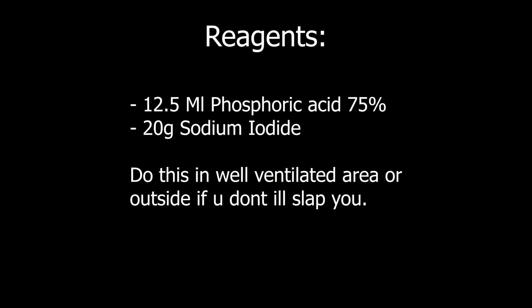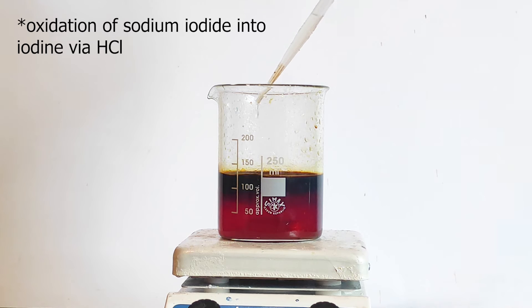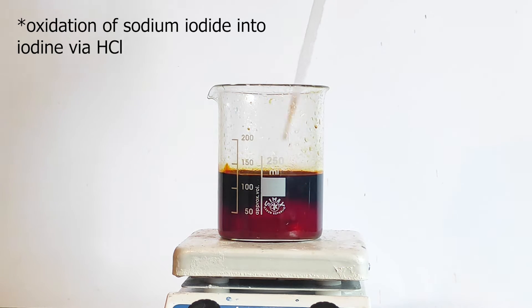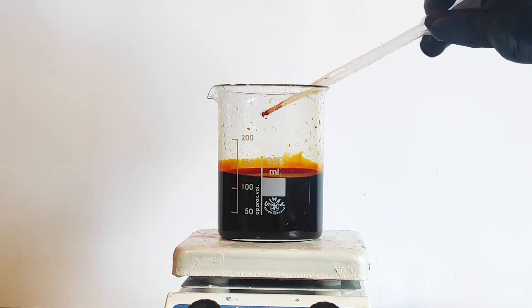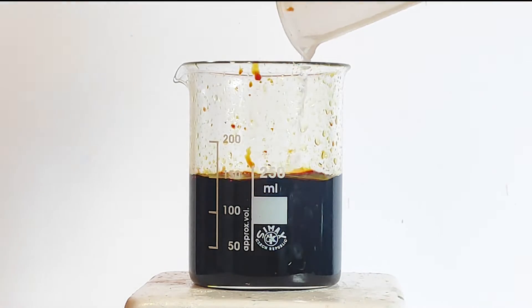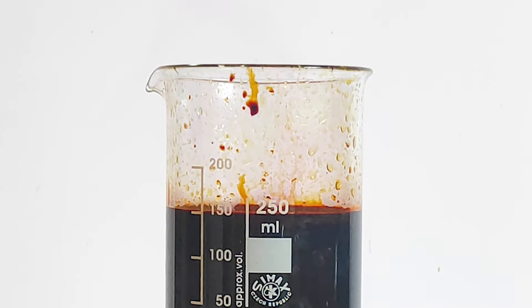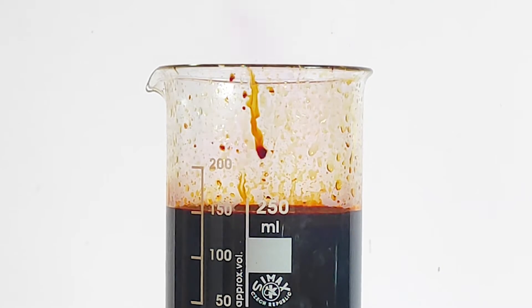For this synthesis I'll be using 12.5 ml of 75% phosphoric acid and 20 grams of sodium iodide. Because phosphoric acid is a weak acid, it won't oxidize the sodium iodide into elemental iodine right away — that's mainly why phosphoric acid is used. If you use an acid like sulfuric acid or hydrochloric acid, it will rip apart the sodium iodide and create elemental iodine.